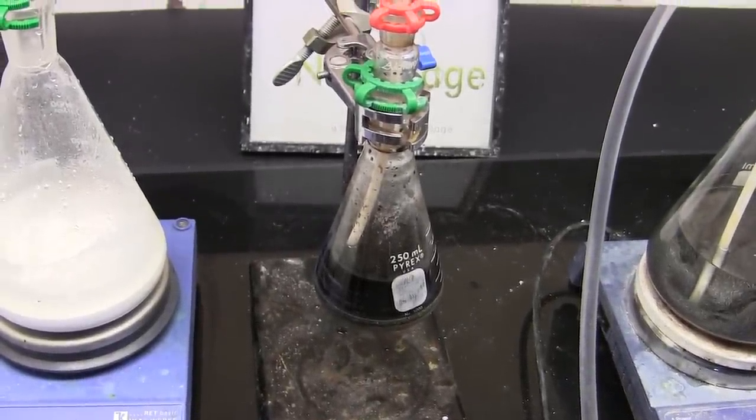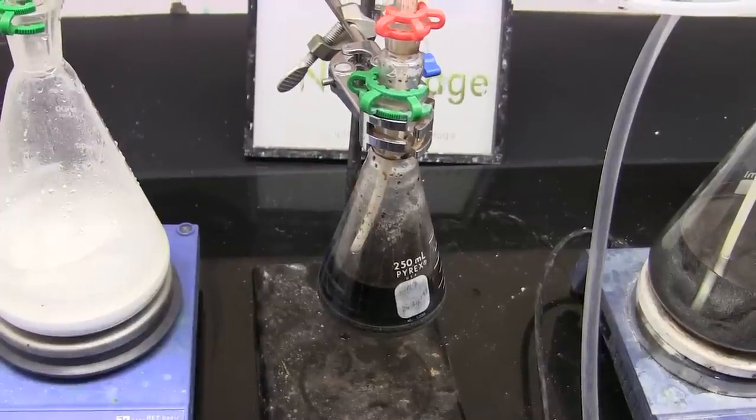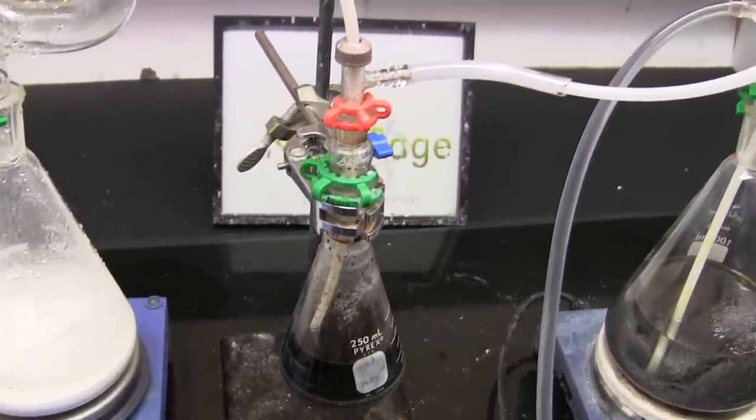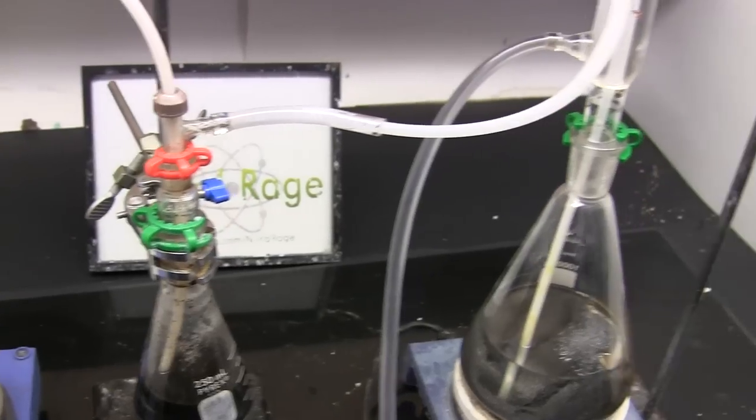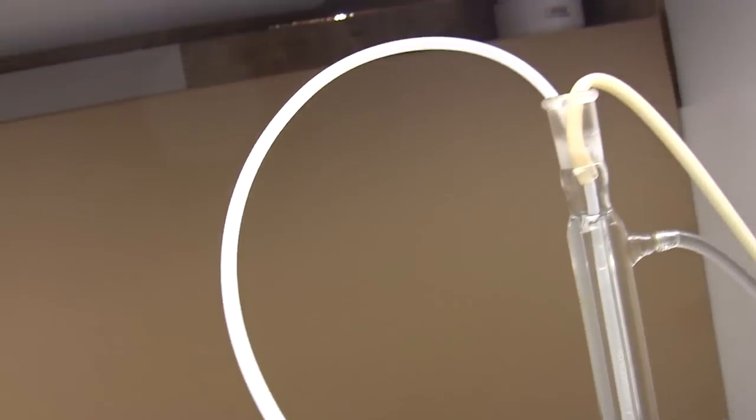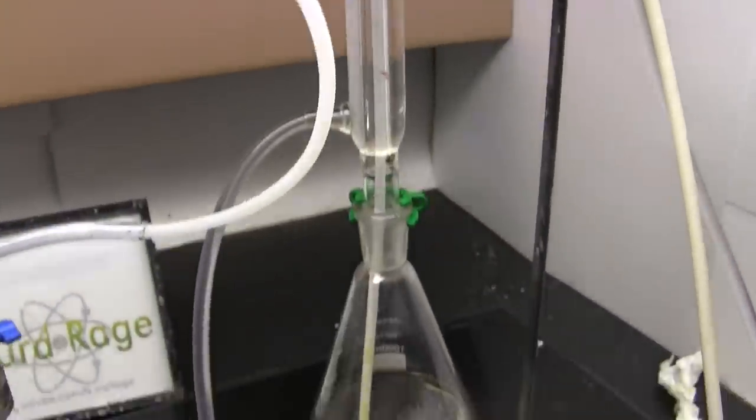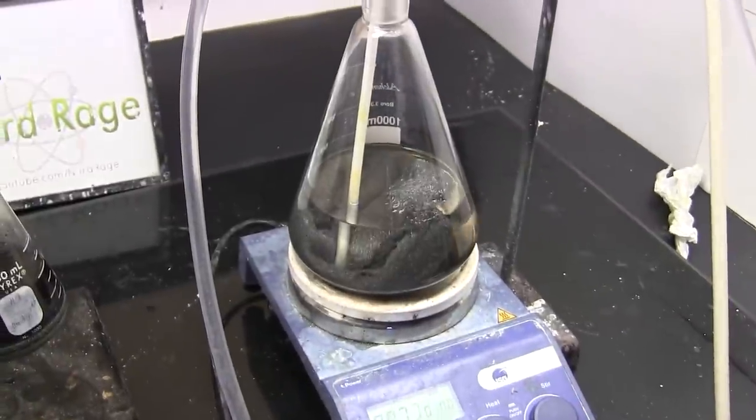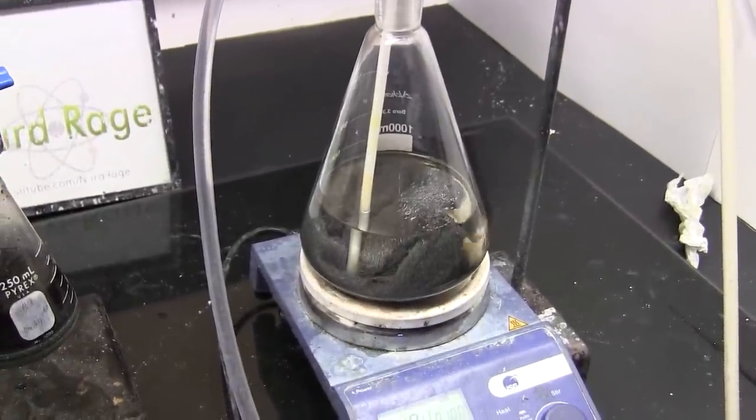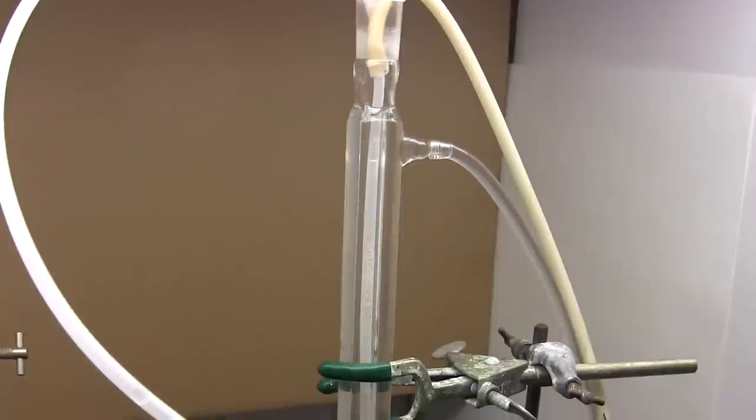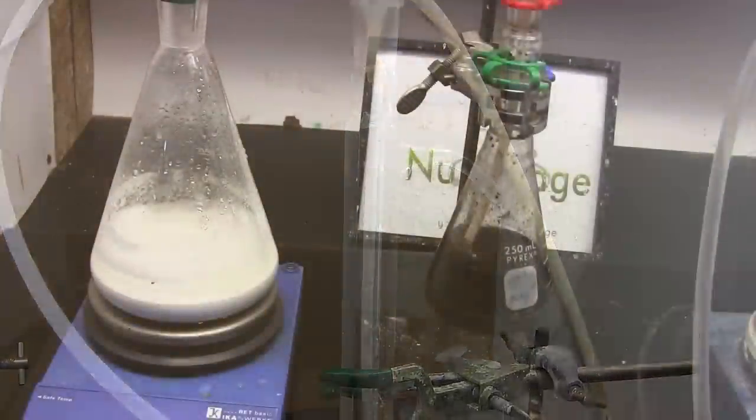My acid is brown and black because it's a very low grade drain cleaner acid. You don't need high quality acid as all it's doing is removing water and won't be part of the reaction. Now the dry chlorine gas exits through this tube where it goes down a reflux condenser on top of our flask containing toluene. The chlorine reacts with the toluene here and any toluene vapor is recondensed by the condenser. Any waste gases are ejected by this vacuum tube on top of the condenser. So let's get started.